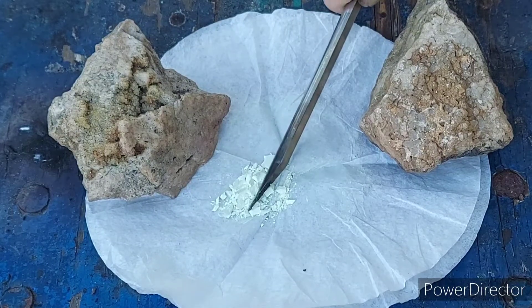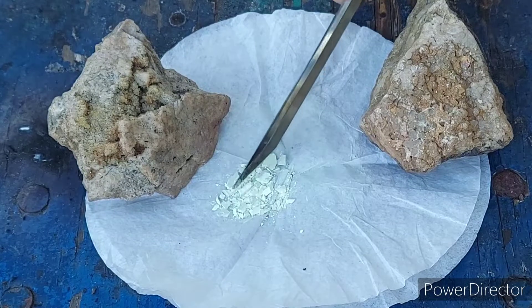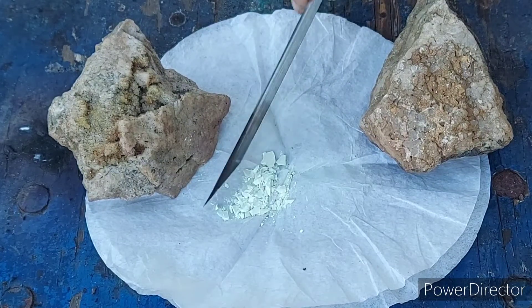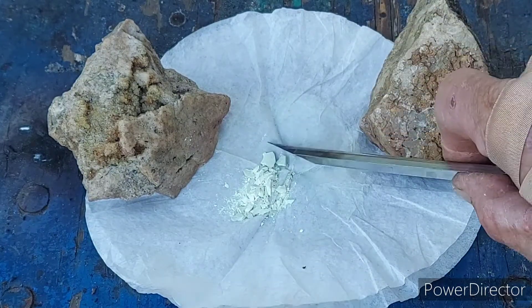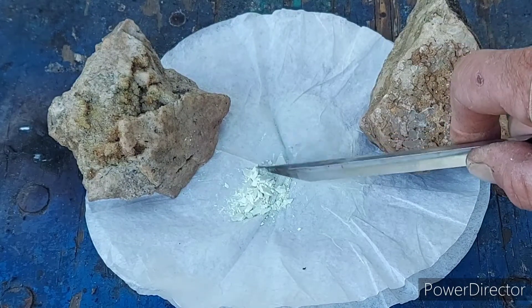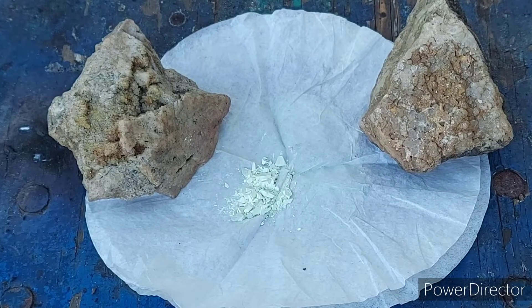It doesn't seem to be the crushing — I think it was the scraping motion before, the friction. Real gentle. And I am going to try to mix this with some sulfur and then light the paper. That way, hopefully you guys can see it, if this stuff decides it wants to cooperate and doesn't want to go up in a puff of smoke on us again.